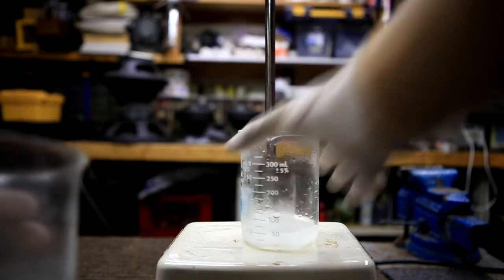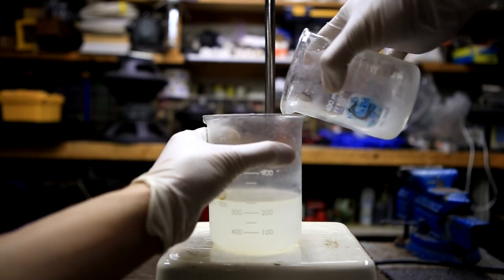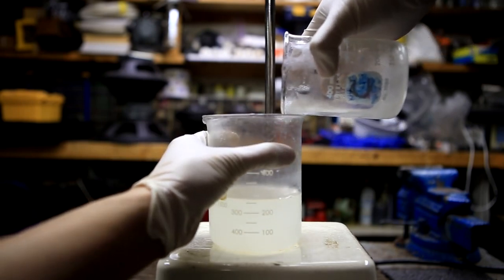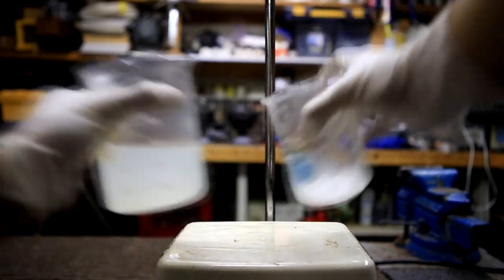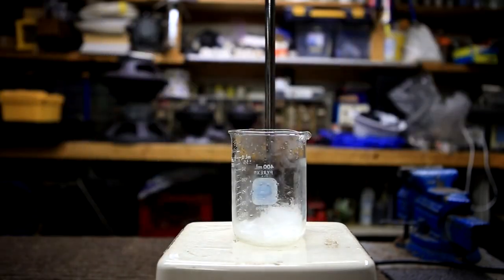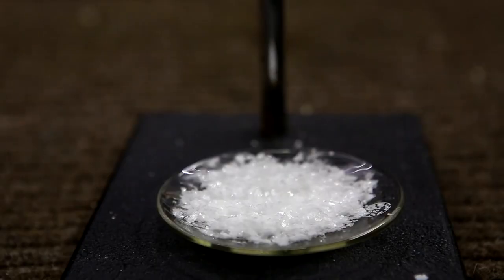You can stop at this point if you only desire moderately pure potassium chlorate. However, I decided to purify the crystals more and carry out a recrystallization. After recrystallization the final yield was about 15 grams of relatively pure potassium chlorate.